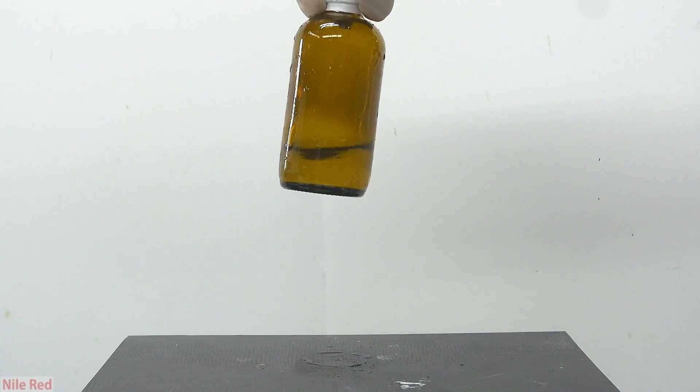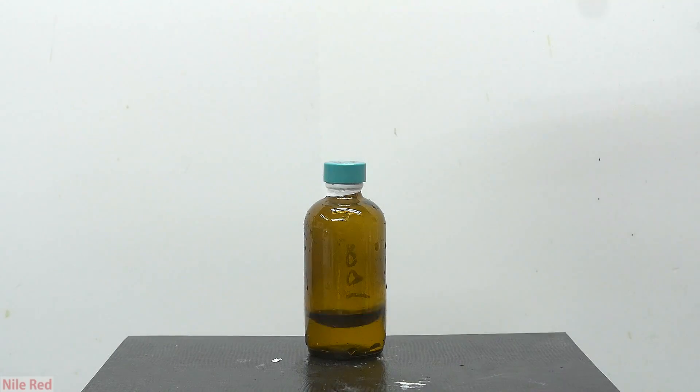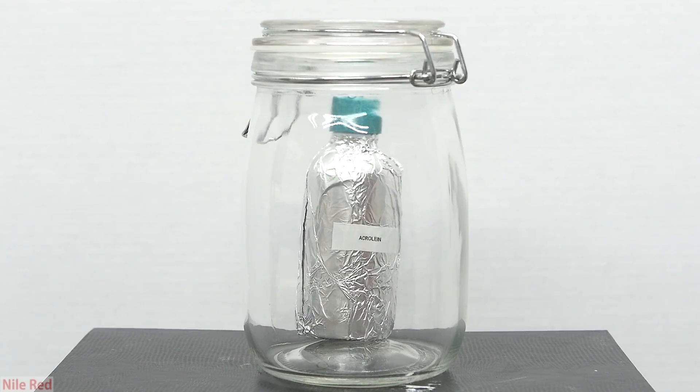Anyway, the bottle was still a little bit wet from the ice bath, so I dried it off and covered it again with aluminum foil. As an added safety precaution, I stored the bottle of acrolein in a sealed jar.